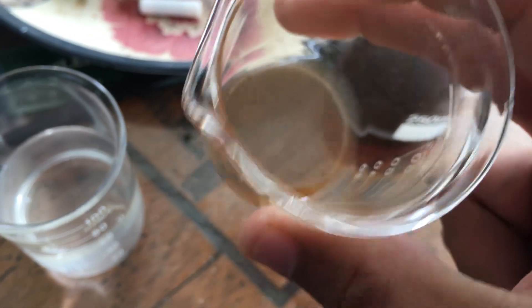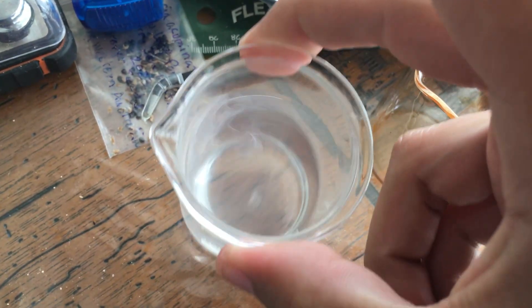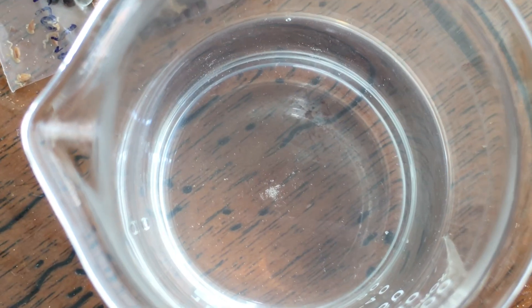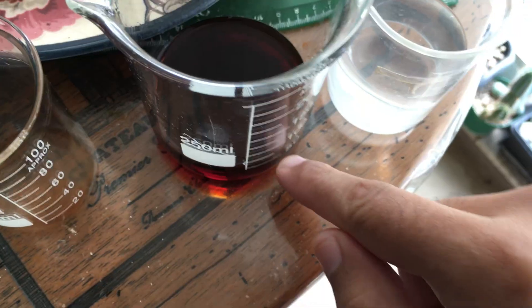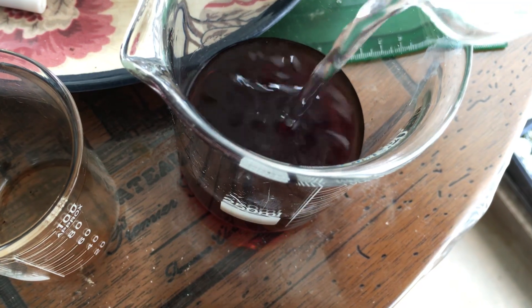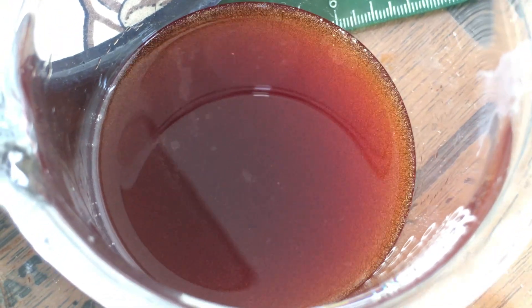I won't wash this — I'll just leave it. There's a small amount of cloudy precipitate here and this is just a salt brine. You can see a very small amount of salt on the bottom. It's about 50/50, so approximately 60 milliliters of each.